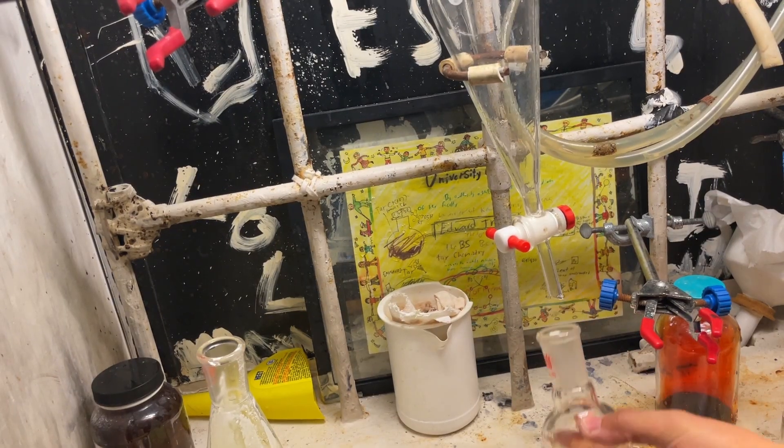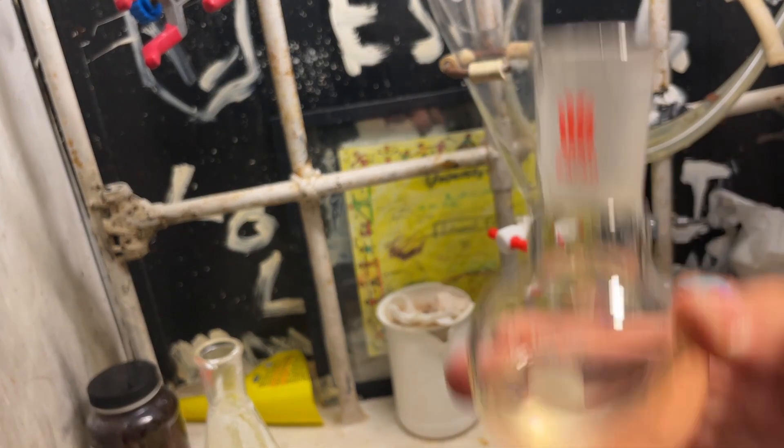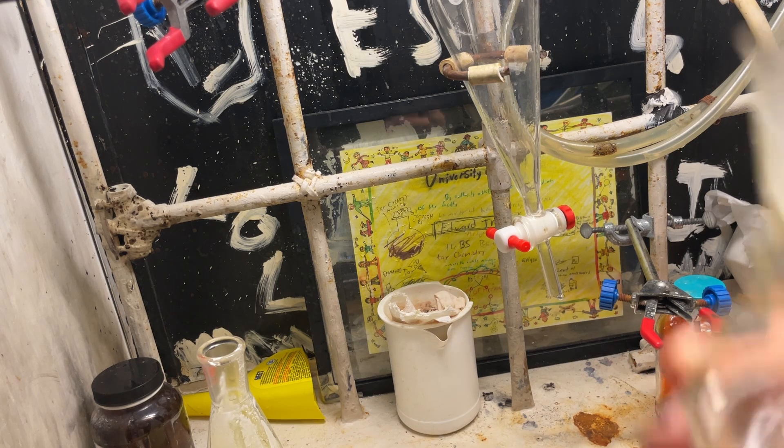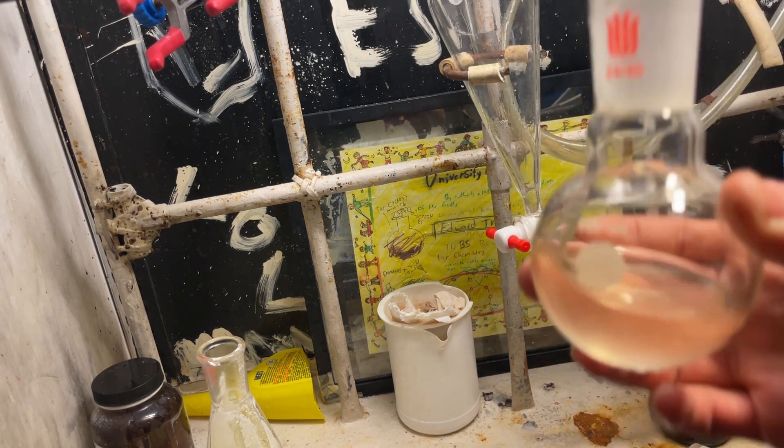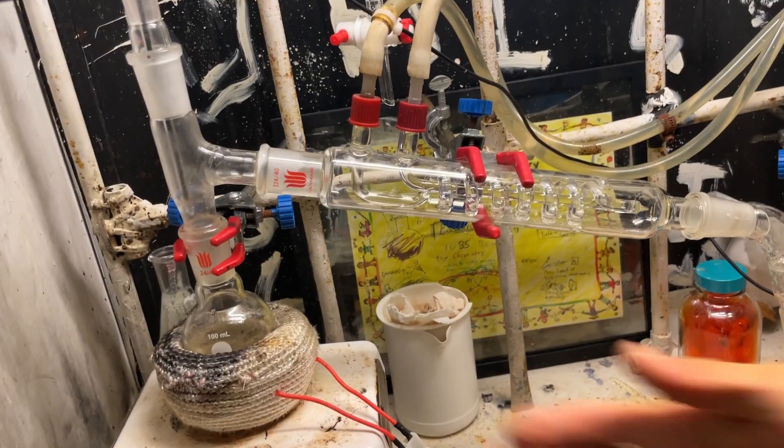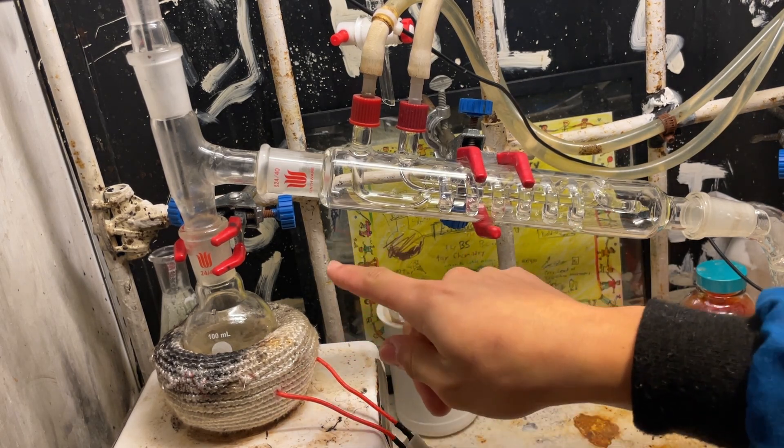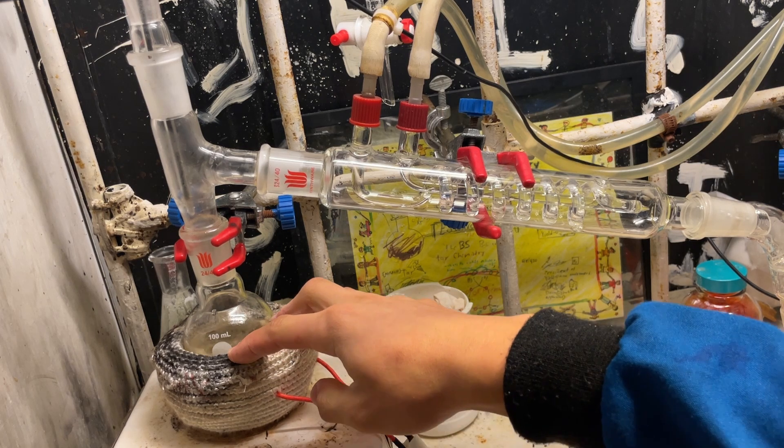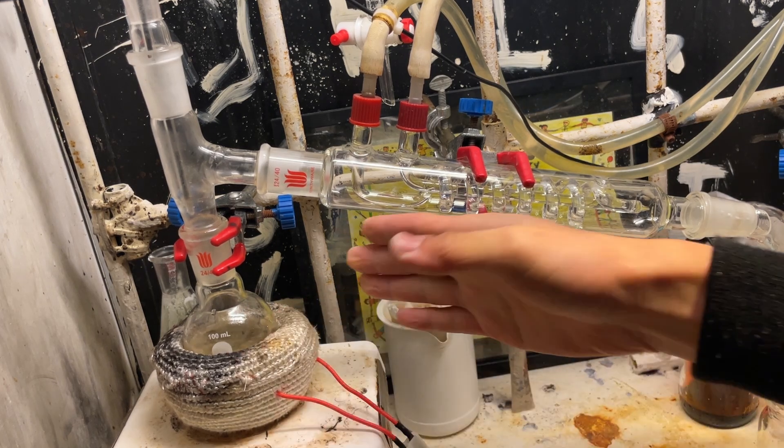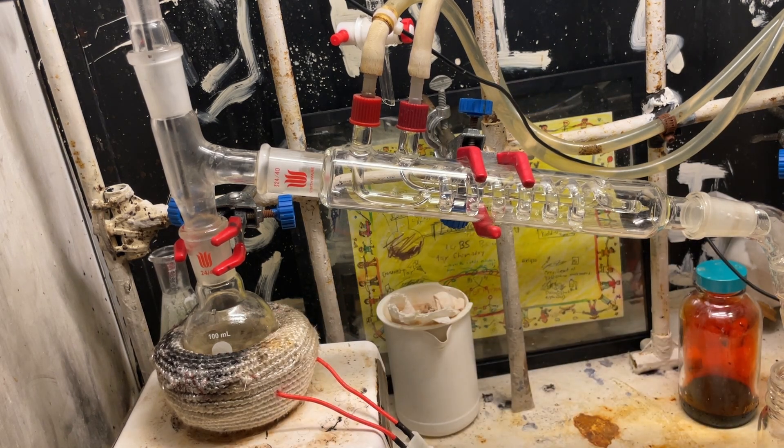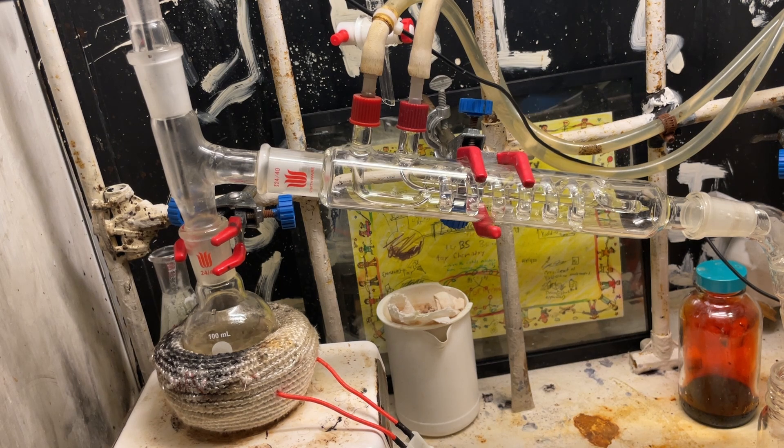Okay, I'm turning the chlorine off so far here it is, we got around 50 milliliters of chloral which is not bad, so now we're going to distill this, so distillation and it's probably going to be a mistake that I could remove the HCl from this, but we'll see, it should be fine frankly for the intended purposes.